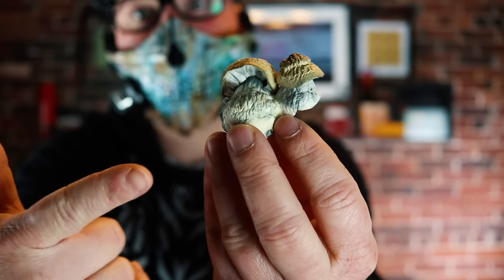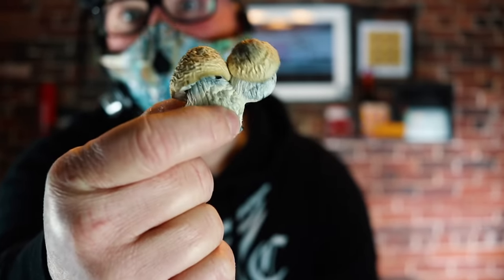Let's say you have some amazing dehydrated fruits but the problem is you don't have the genetics. You can't get spores, you can't get a spore swab from the dehydrated fruits, but you really want to have these in your genetic library. Lucky for all of us, you don't need spores to hijack those genetics. I'm going to show you how to reanimate the mycelium so you have the genetics in your library, even without spores, an LC, a swab, or anything like that — just with the dehydrated fruits.